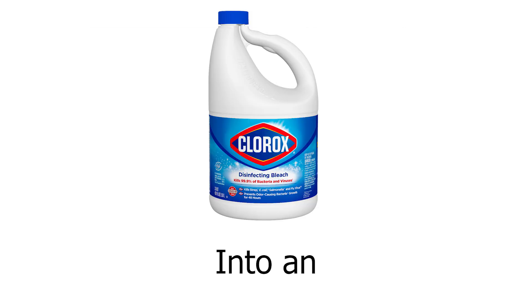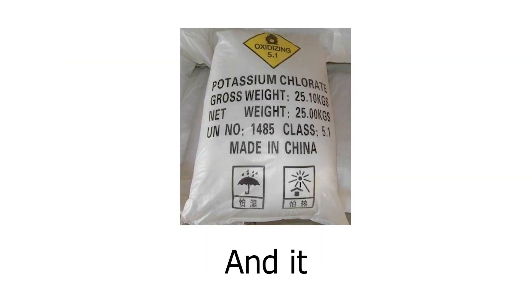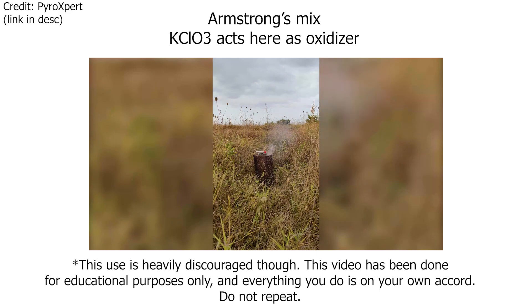In this video I'll be turning regular bleach into an extremely unstable and powerful oxidizer which can be used in most amateur rocket fuel compositions. This oxidizer is potassium chlorate and was once used in fertilizers and now it's mostly known as the go-to for amateur pyrotechnics.